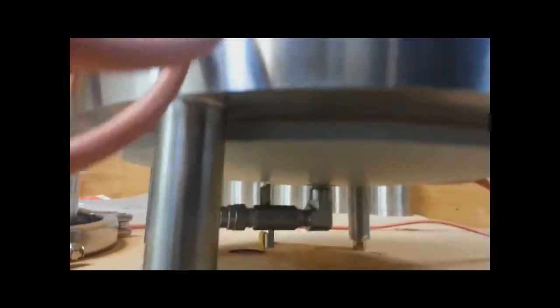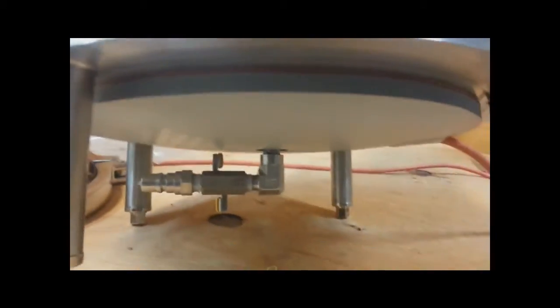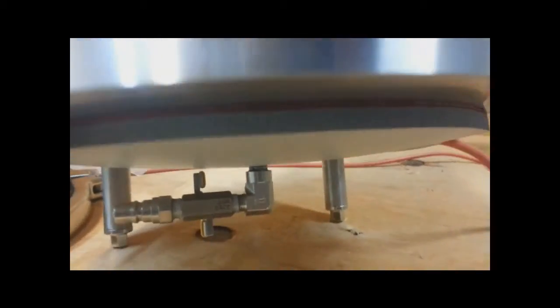And your other heating jacket is an adhesive permanently bonded to the bottom of the extractor tank. Notice that the extractor tank's dished and there's a drain hole in the middle.